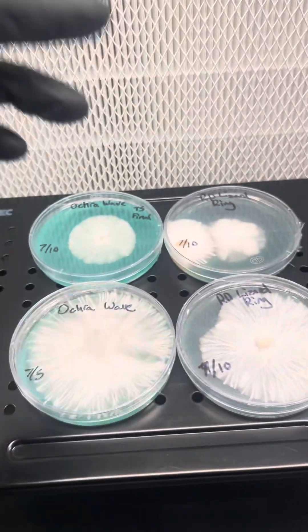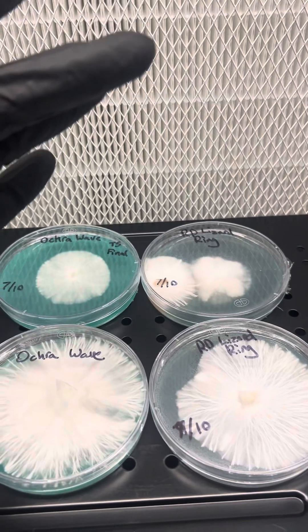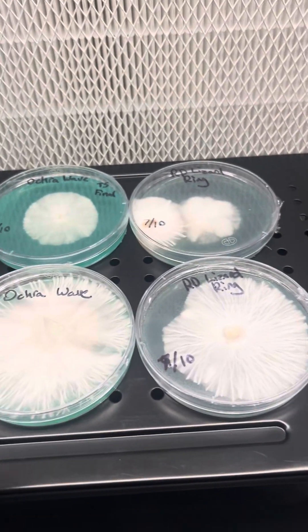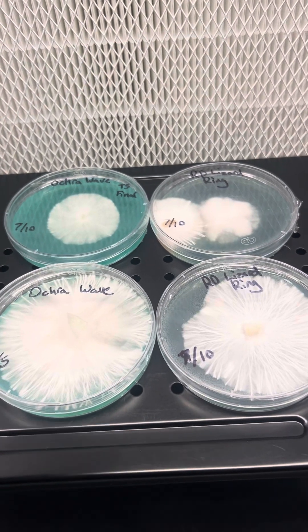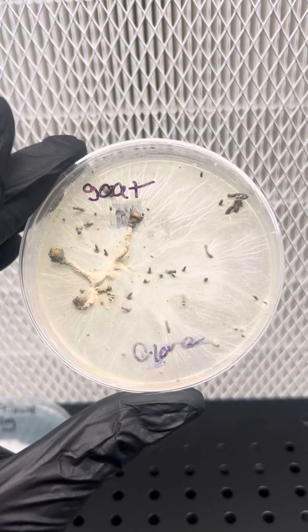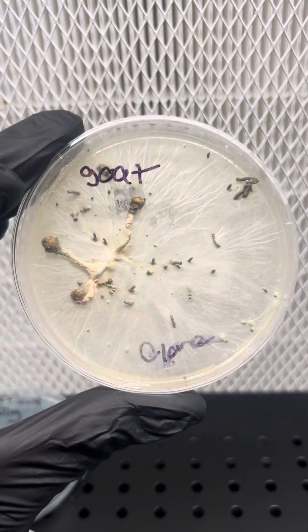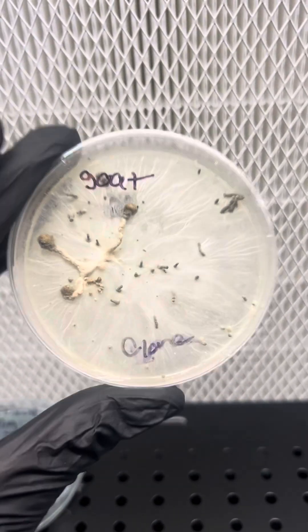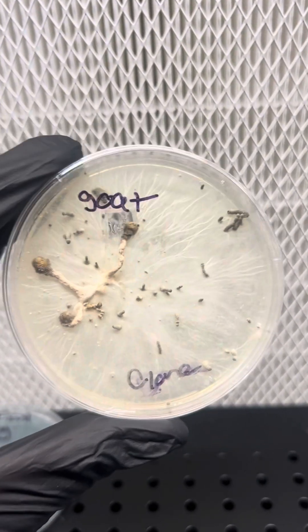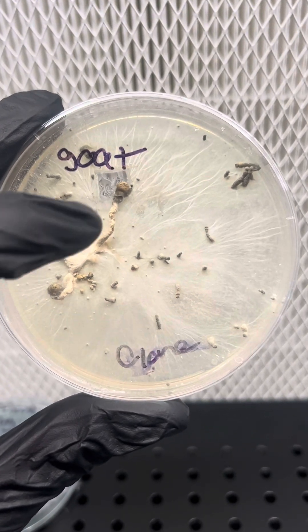I hope this makes sense. Sometimes my brain works weird when it comes to stuff like this, so let me explain something in a way that I've never really heard before. Here's an old plate — ignore the fact that it's old. Refer to this plate as your tub.